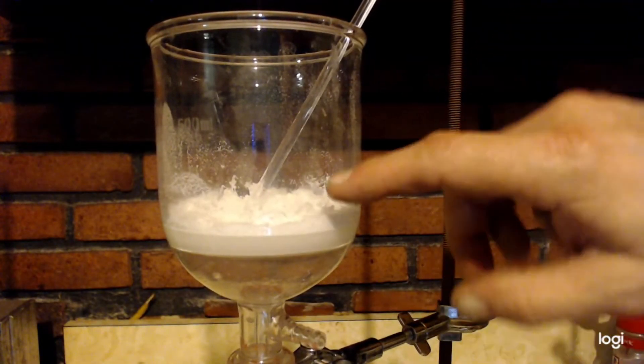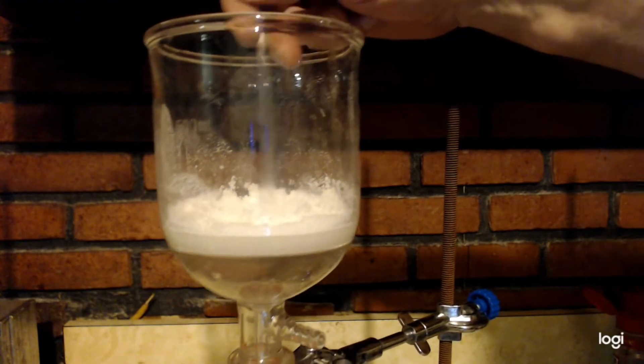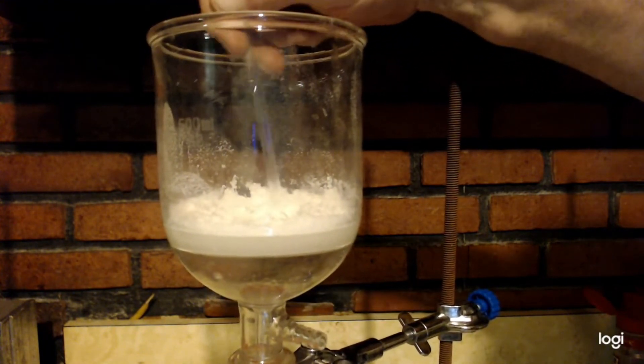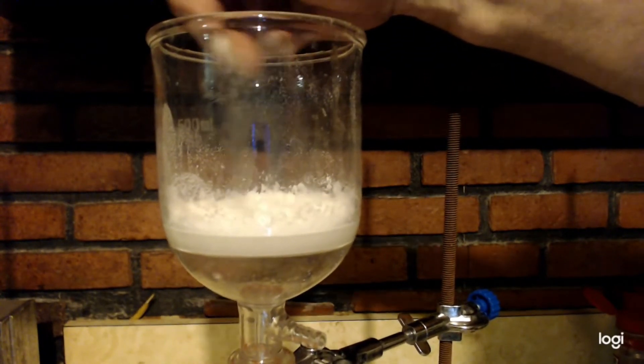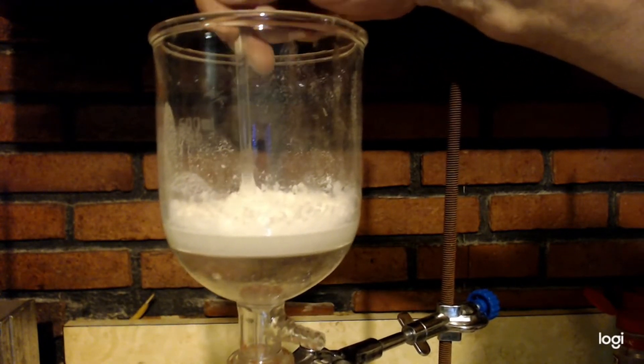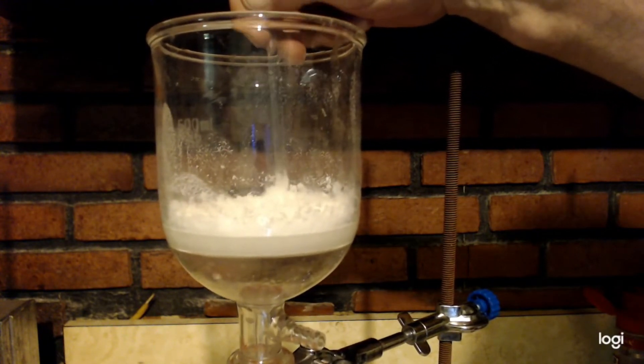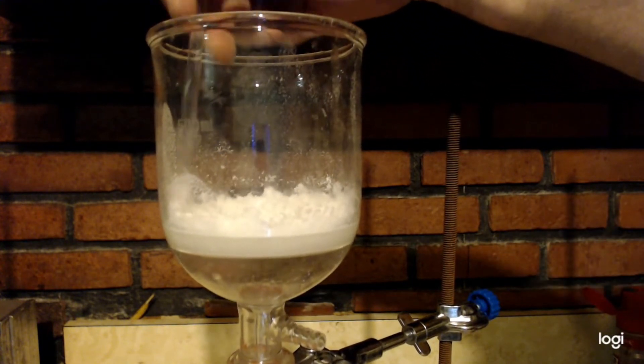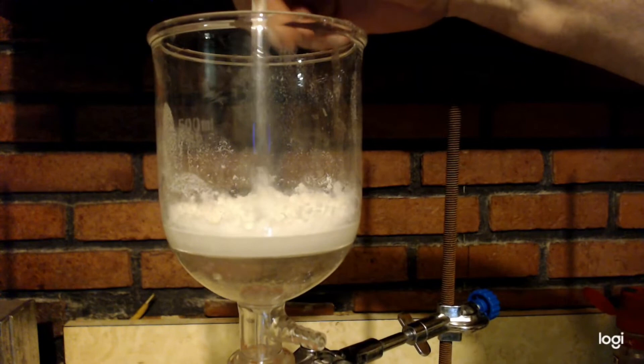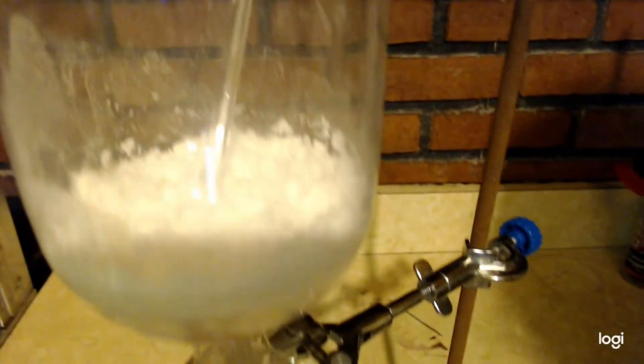Okay, so this is the ammonium chloride that I filtered out. You can see it's still wet, but somewhat dry. It's probably half of what was there in the first place. This is probably how much methylamine hydrochloride I'll make, which is not much. But who knows, we'll never know until we're done. But I can put this with the other ammonium chloride that I made. You can see it's nice and white.